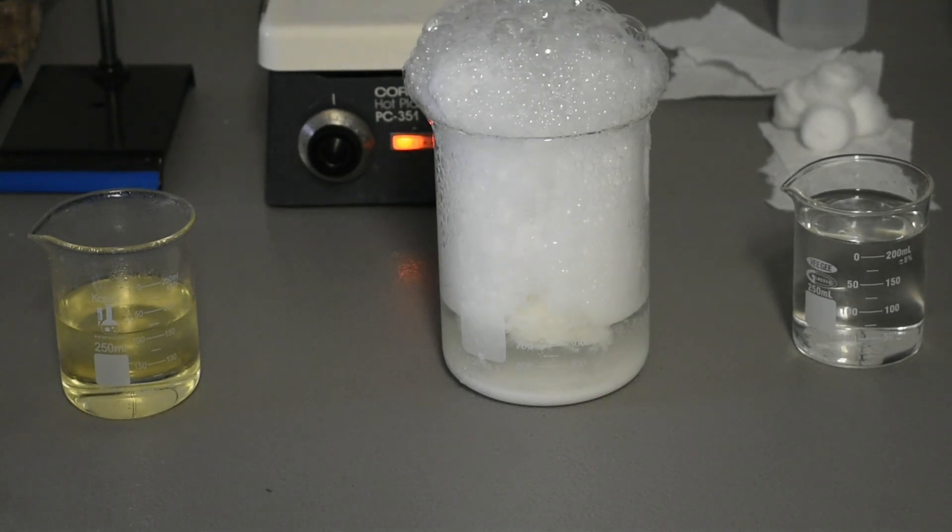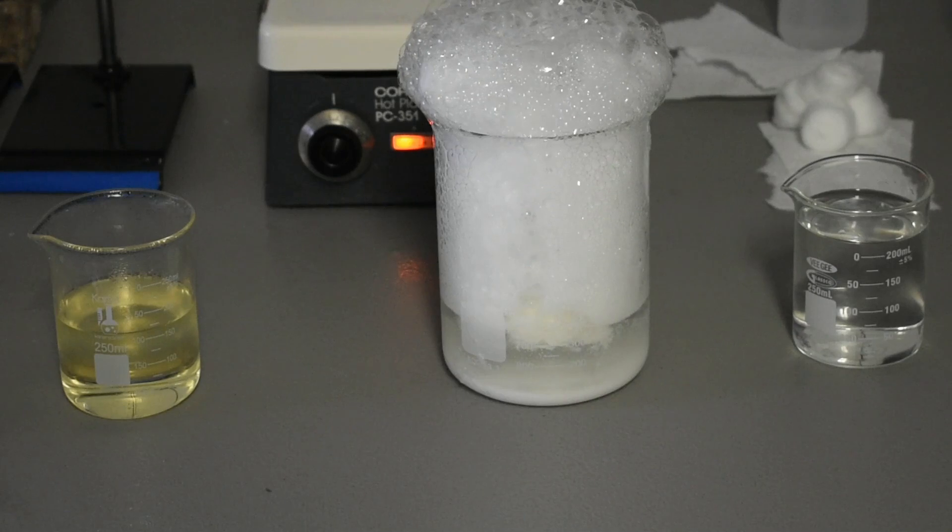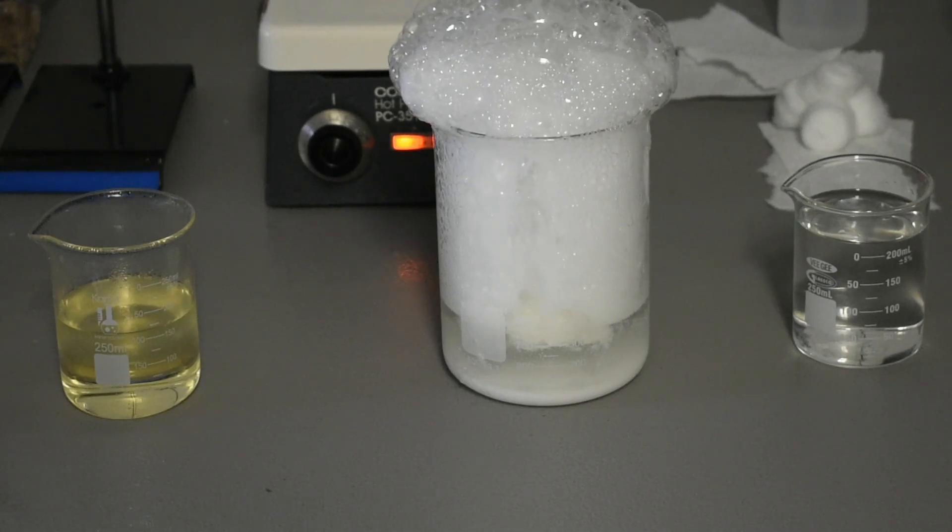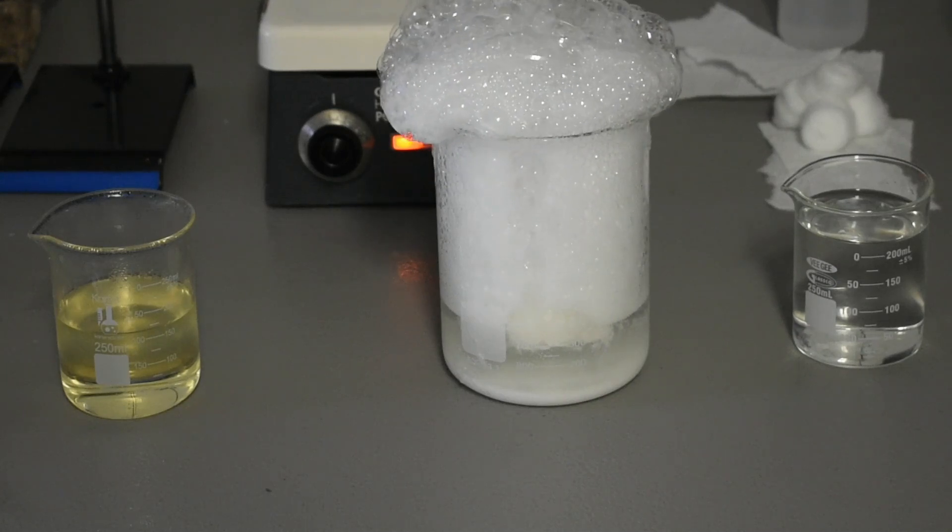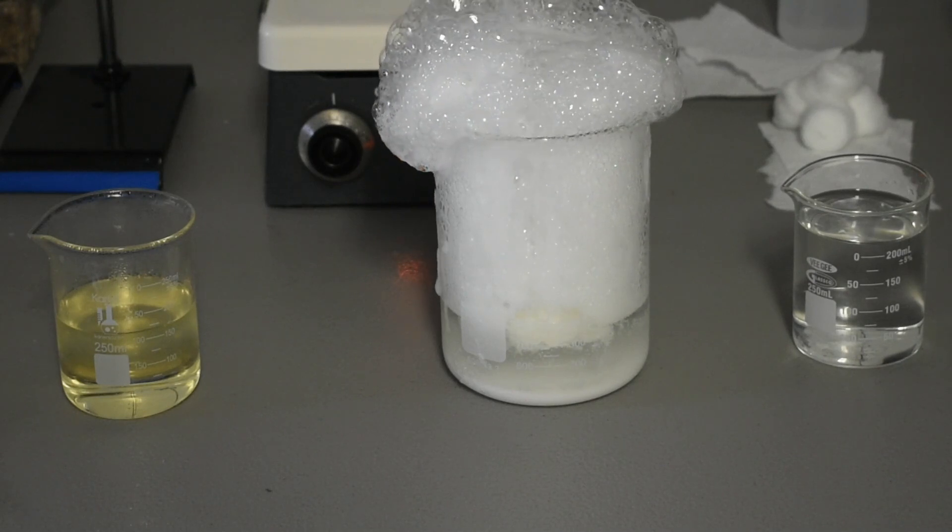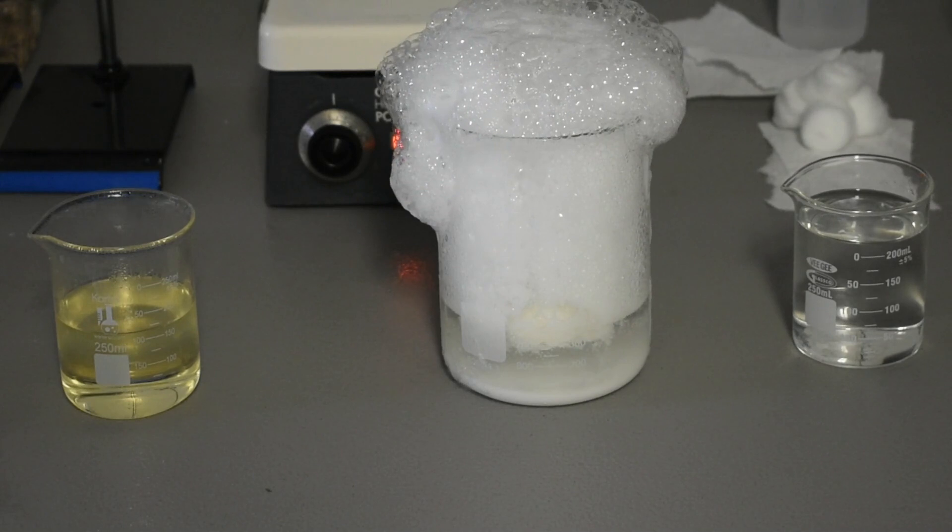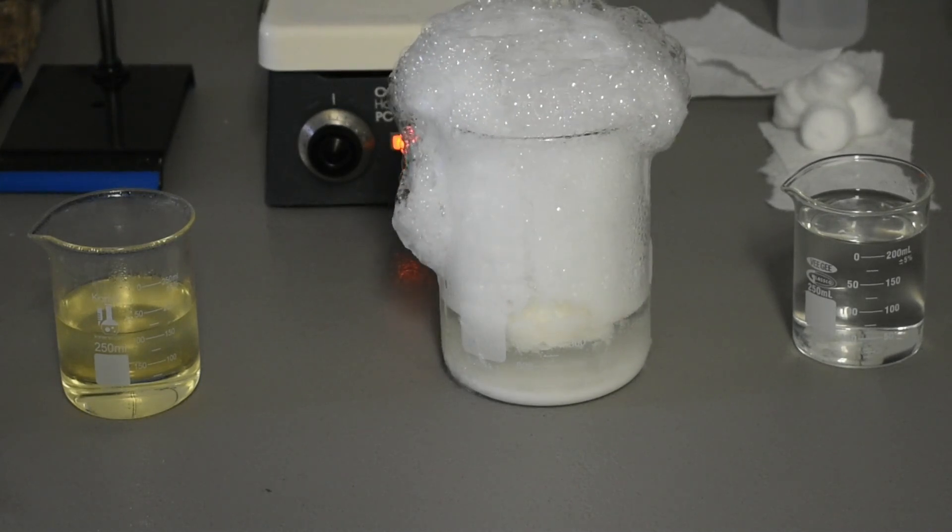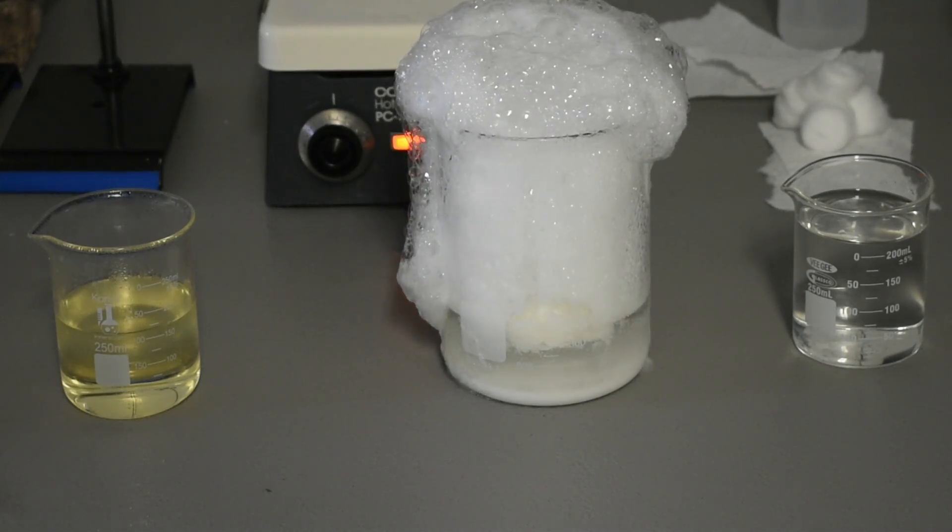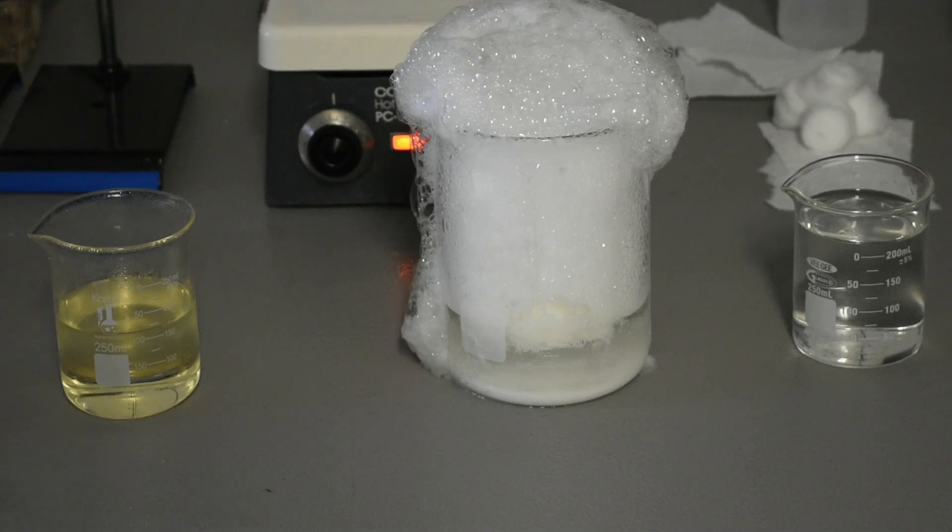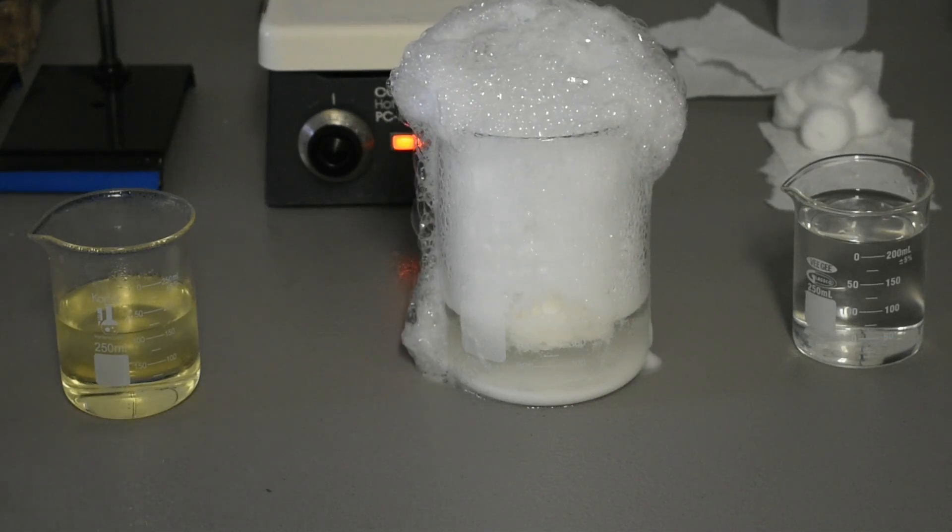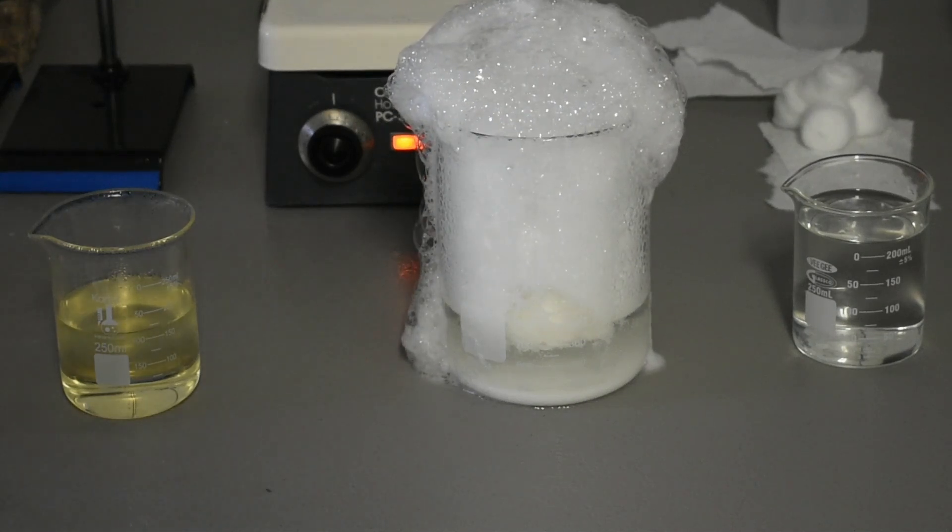Looks like it's going to overflow. Yep, you'd think I would learn my lesson, but oh well. I'll let this calm down, clean up again, and then come back when both cotton balls are done soaking.